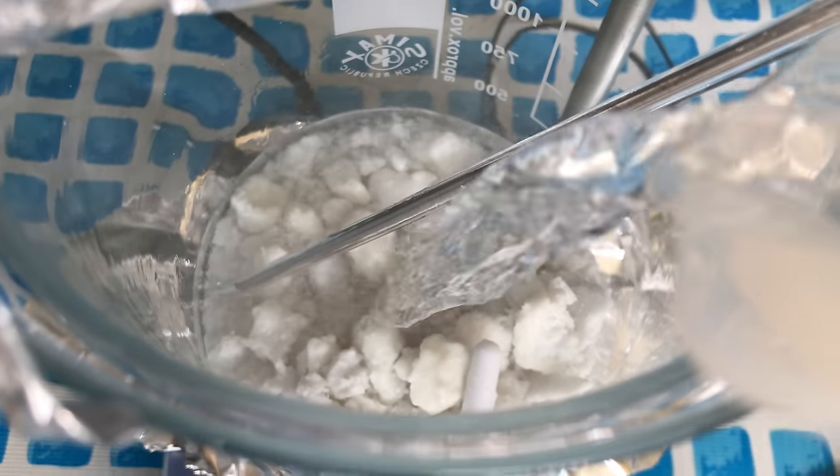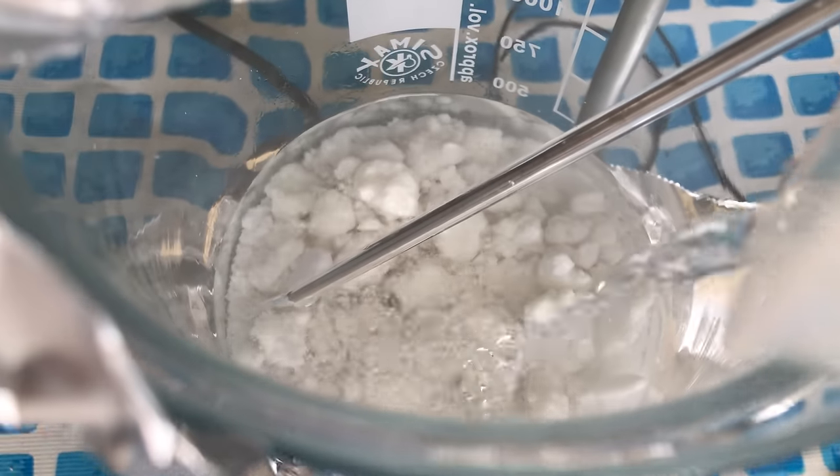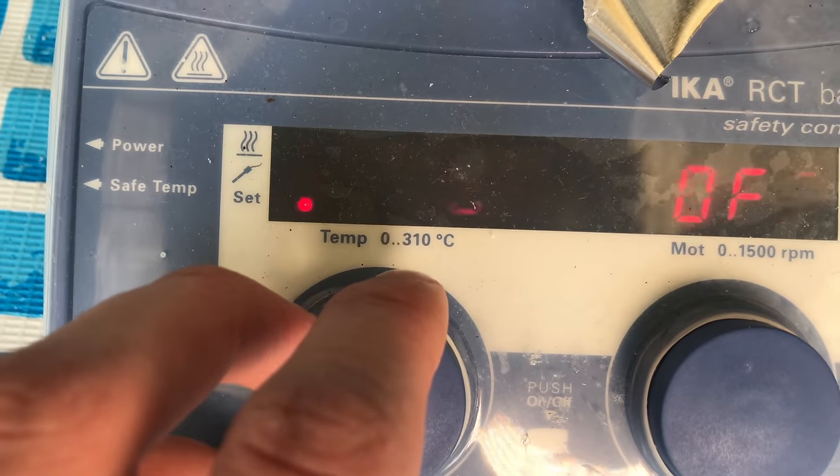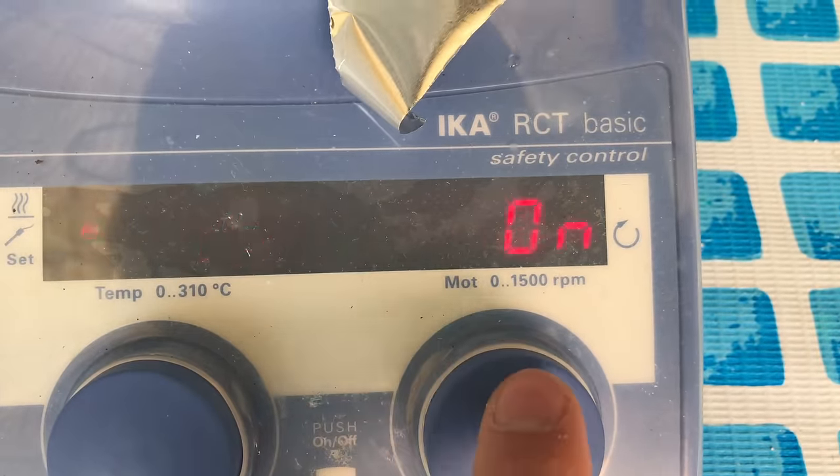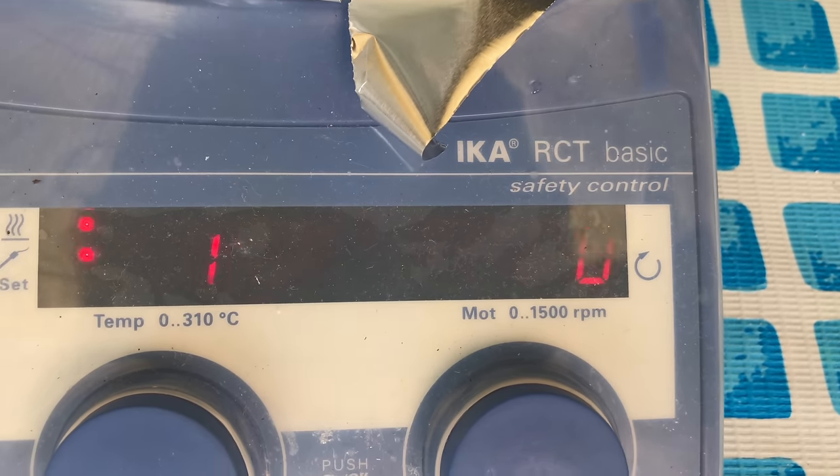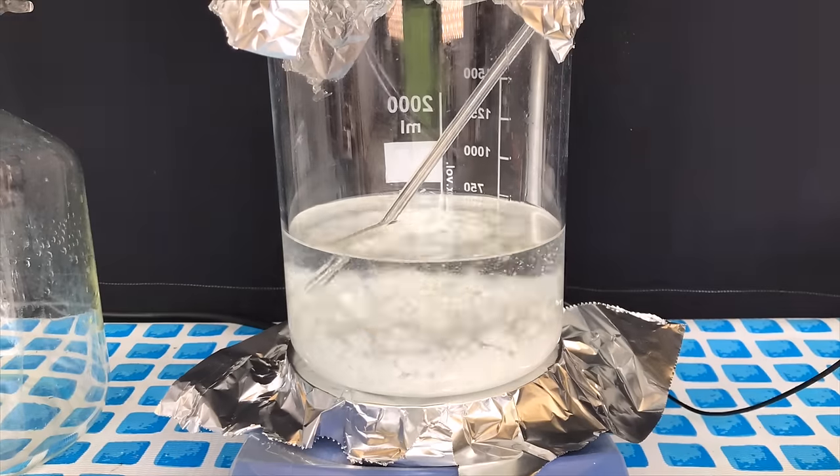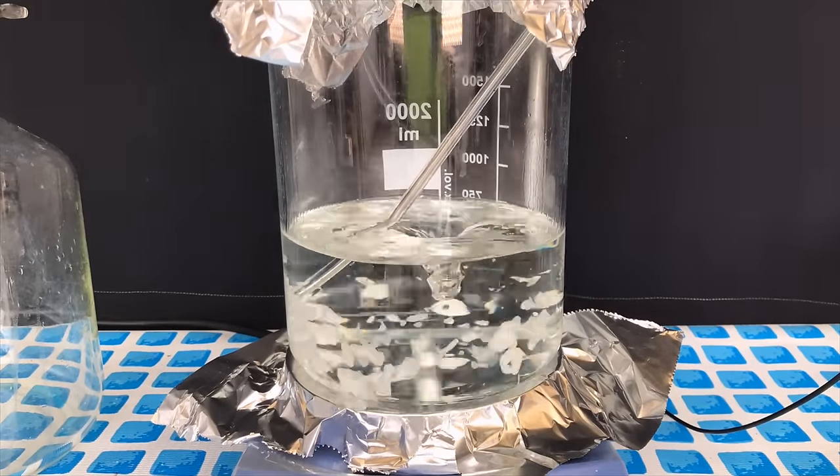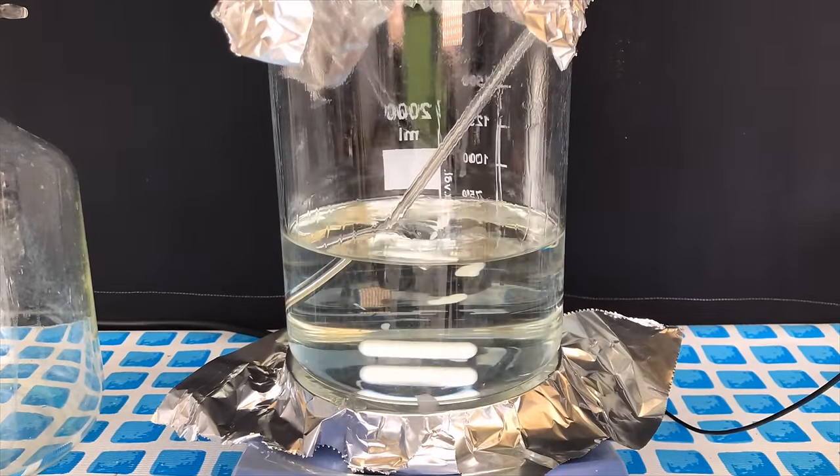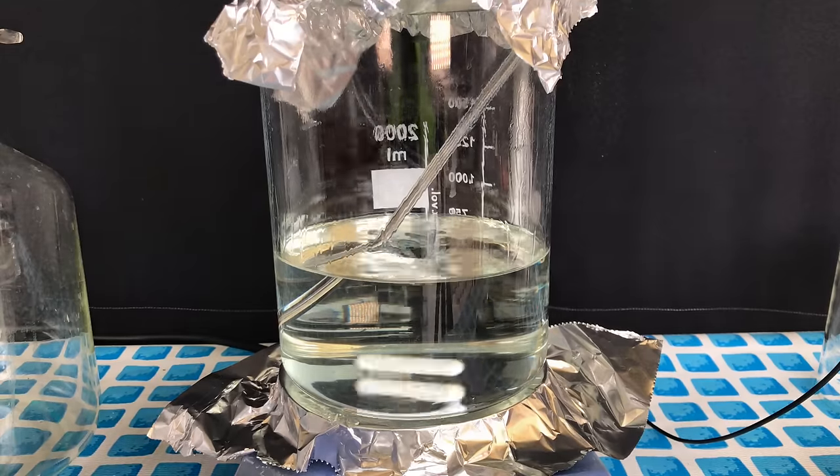The next step is going to be fun. I dried the wet product in a vacuum chamber to get rid of some leftover water and I got rid of about 10 more grams of water. But now we are going to get to the oxidation. I don't know if the product in the paper contained more water than mine and therefore I'm still going to use the same amount of chemicals. We dissolved everything in 610 ml of glacial acetic acid by heating to about 40 degrees celsius.